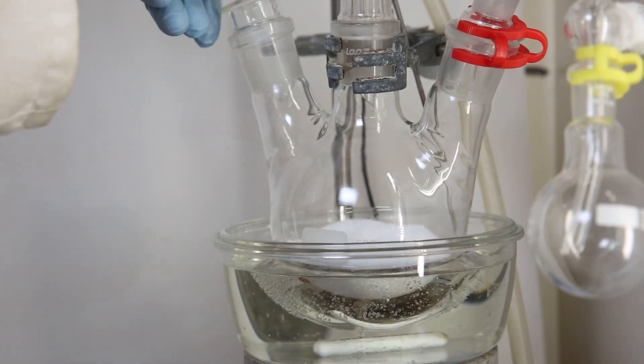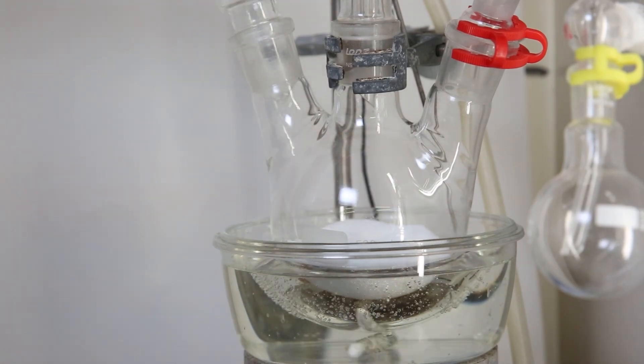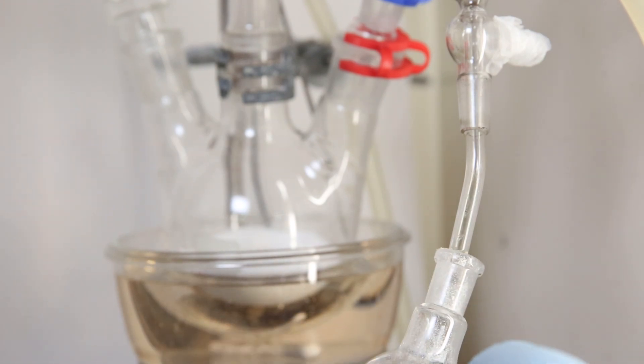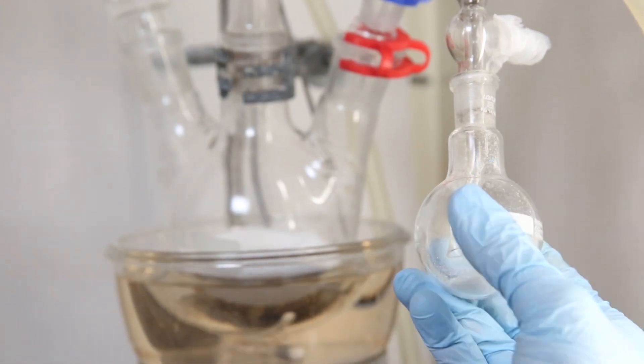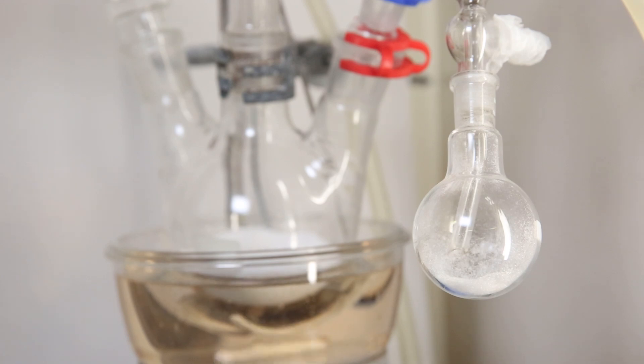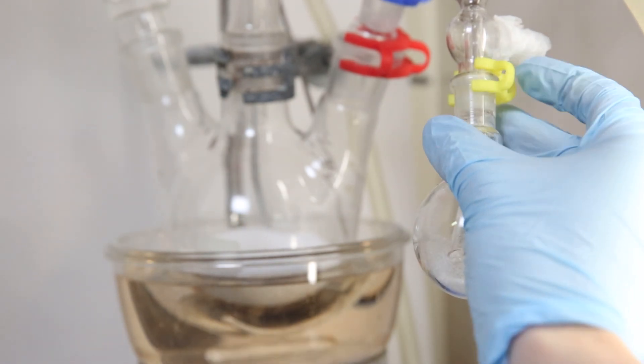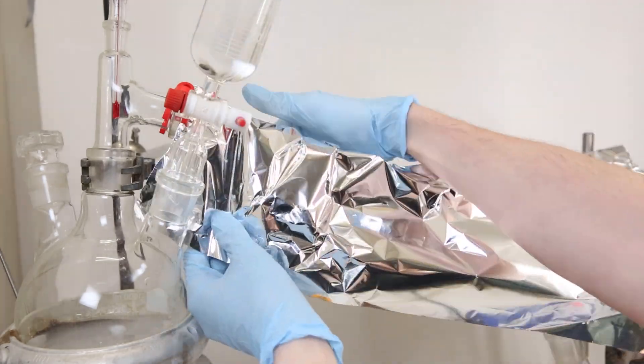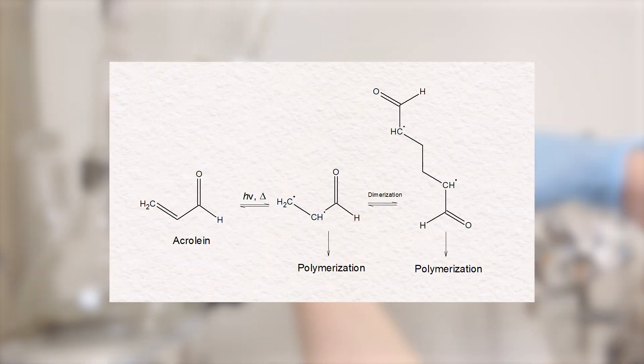Then I close off the flask with a stopper and move on to the second receiving flask. To this flask, I add around 1g of hydroquinone. Now, the last step is to cover the whole apparatus in aluminum foil. Since Acrolein can start to polymerize due to light, especially when hot, it is best to minimize any light exposure.